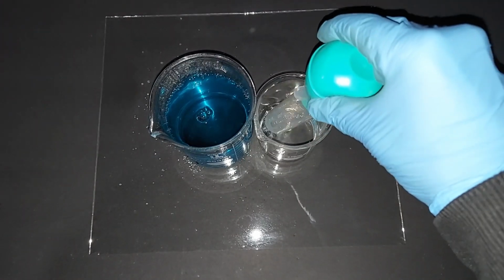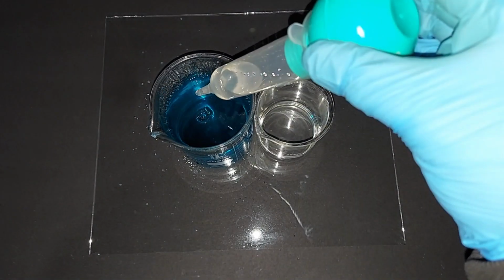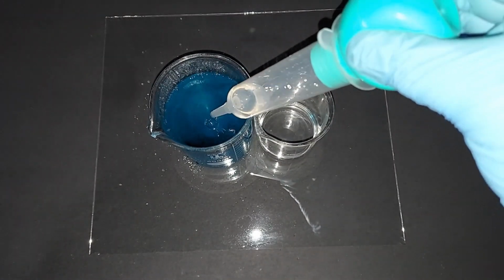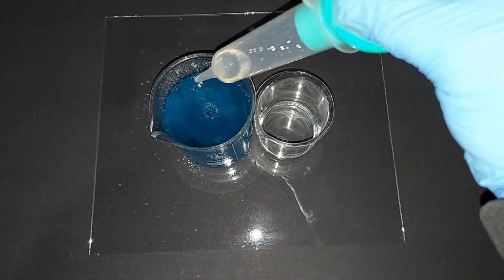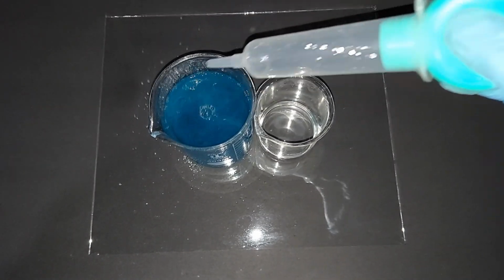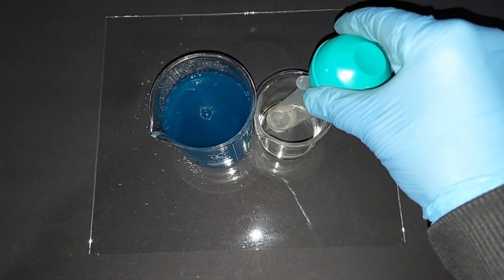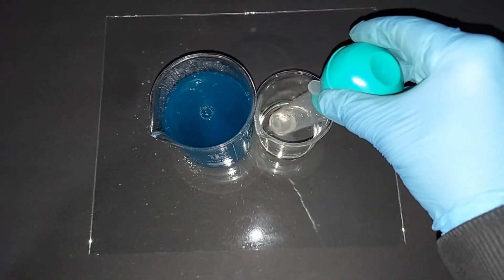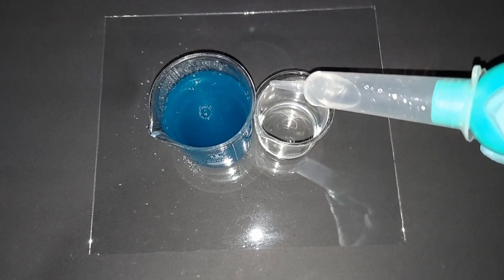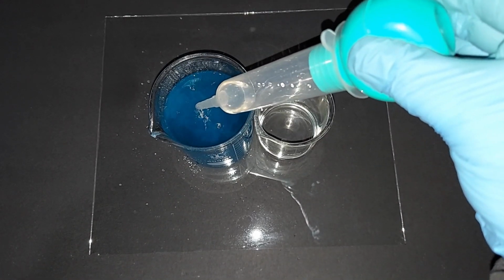At this point, you can start to see a slight color change, more turning of a green than a blue-green. Or I should say maybe a dull blue-green. I think we're right at the point where, titrating it from an acidic solution to a basic solution here, once all of the acetate is used up, we'll start to drop out of solution our copper acetate. I'm sorry, copper carbonate.